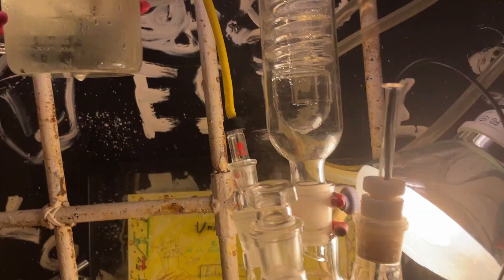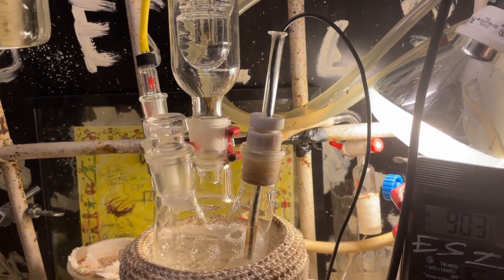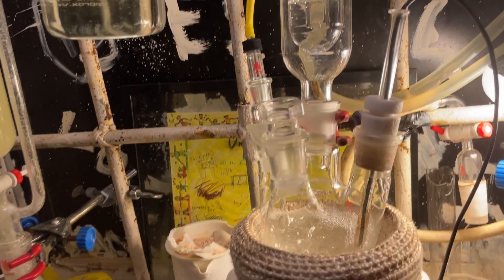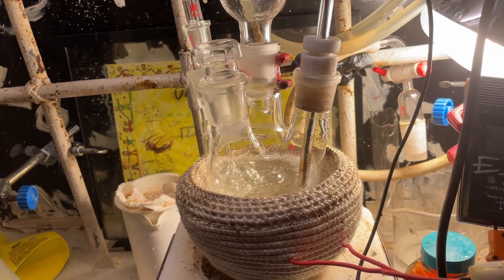It's actually not bad. So it looks like the chlorine's escaping. Well, the reaction's actually at 90 now, and I think I'm out of chlorine, though.